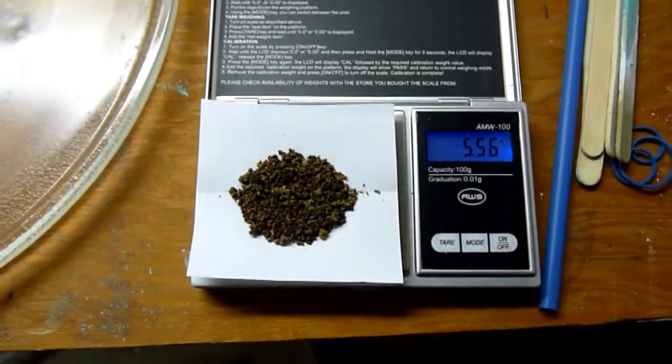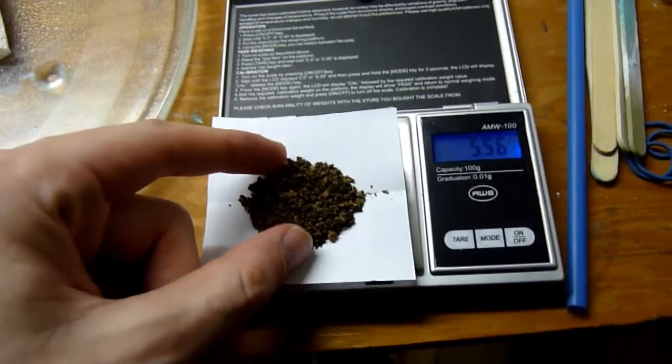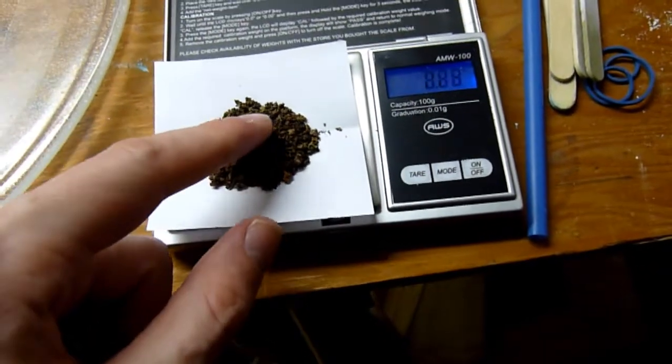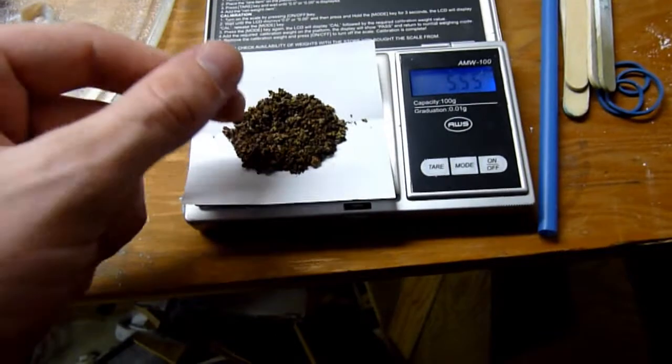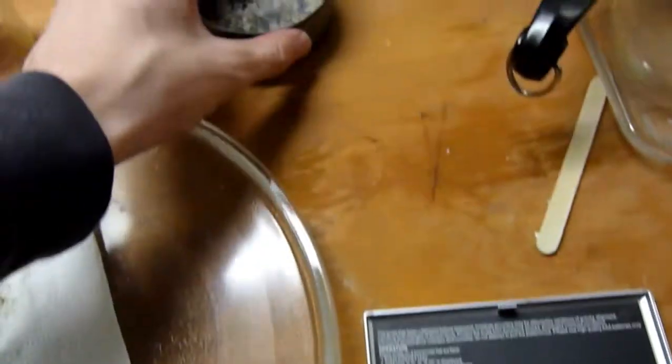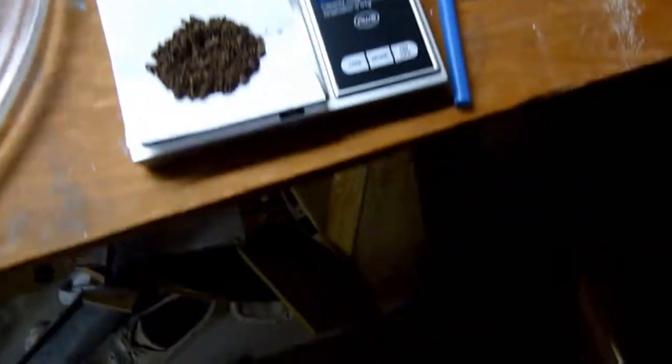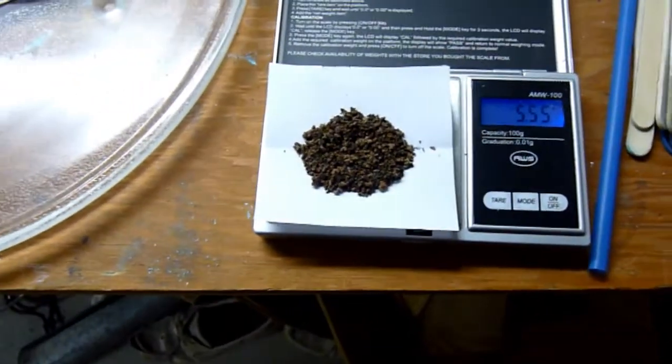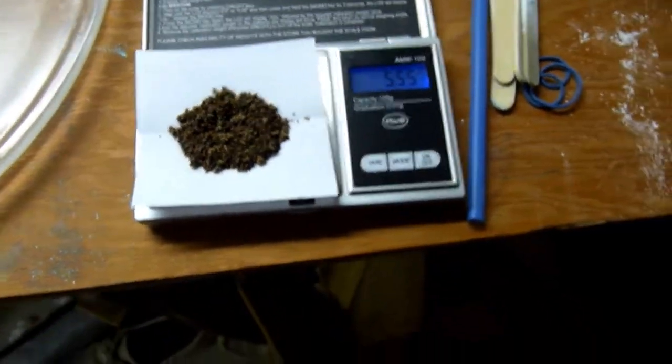Well we got the copper washed and rinsed and looks like there's 5.56 grams. As you can see the copper is this characteristic sort of orangish color, although I think it looks black because it's so fine. And also there could be some carbon impurities from garbage that was in the can because it was like enameled or something. But this is only just under 40 percent of theoretical yield of 13.8 grams.